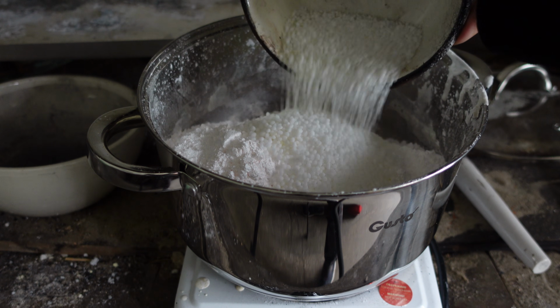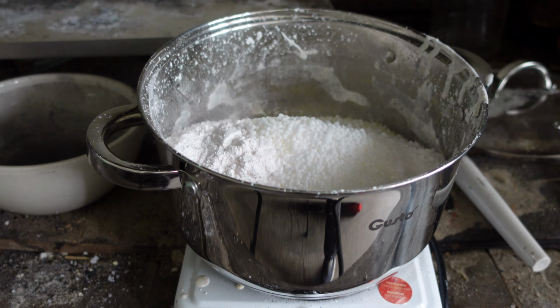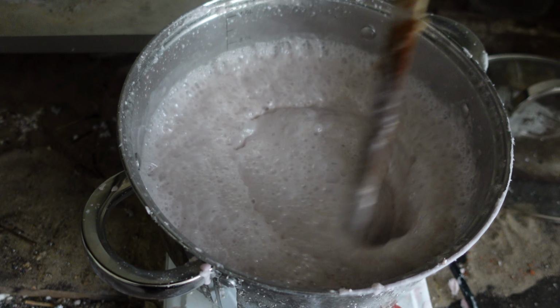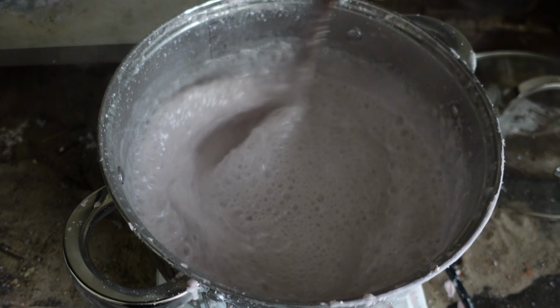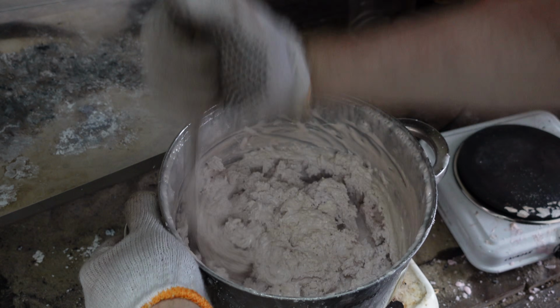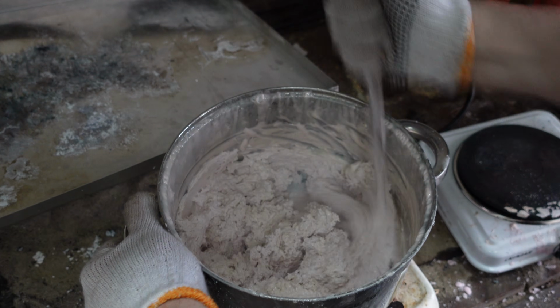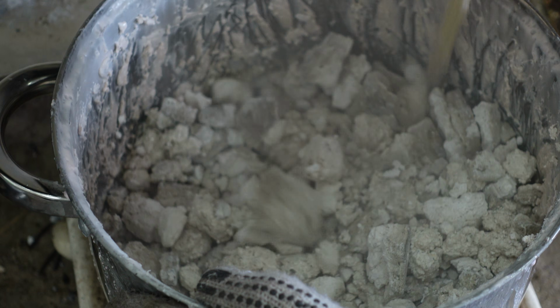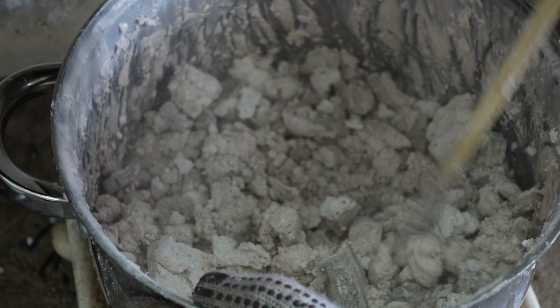We mix our calcium oxide and urea together and start heating them on a hot plate. When the reaction kicks off, it foams up heavily and always tries to escape the pot. Keep stirring it. After a while, the mixture thickens and the foaming subsides. Eventually, it solidifies completely. After about an hour on the hot plate, the cyanate synthesis is complete. Here's what it looks like.